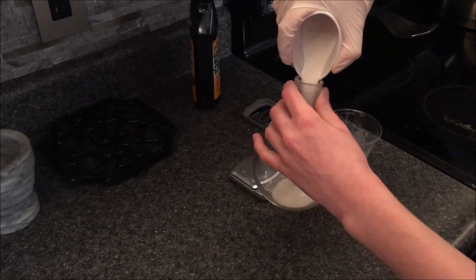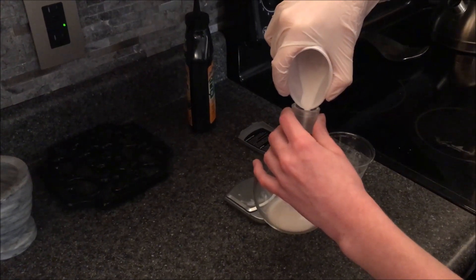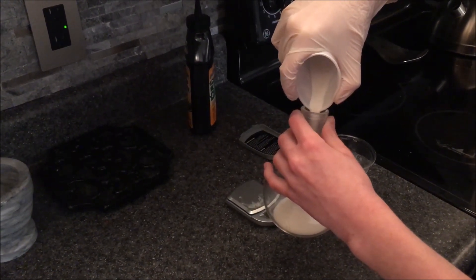I added the potassium nitrate into a flask. I later moved the contents into a larger flask because I needed more room.